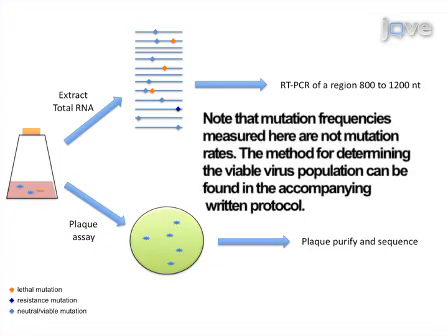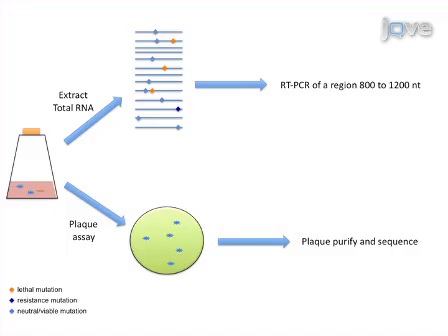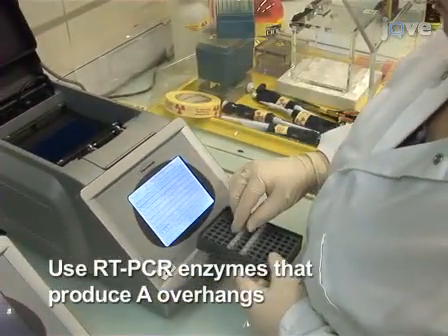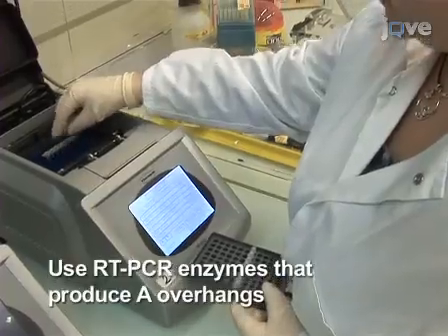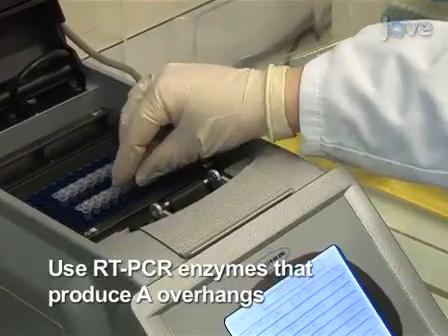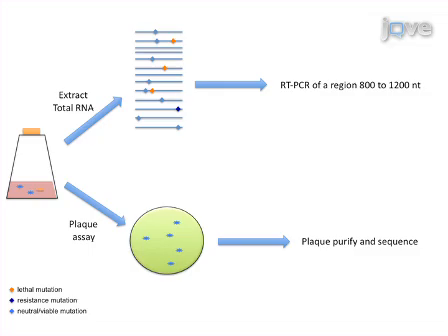Next, to confirm that the identified polymerase change conferring resistance to mutagen alters replication fidelity, mutation frequencies are measured. This can be performed on either viable or total virus population. To determine mutation frequencies of the total virus population, which includes viable and non-viable variants, extract the RNA and RT-PCR amplify an 800 to 1200 nucleotide region from a coding sequence that is known to have genetic variants, such as that coding for a structural protein.